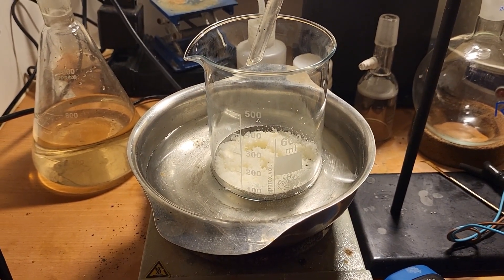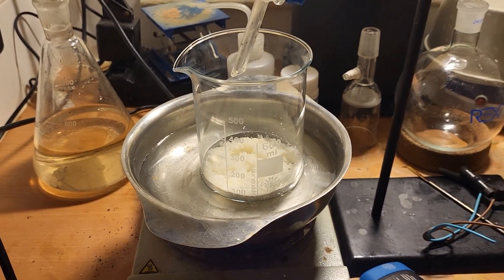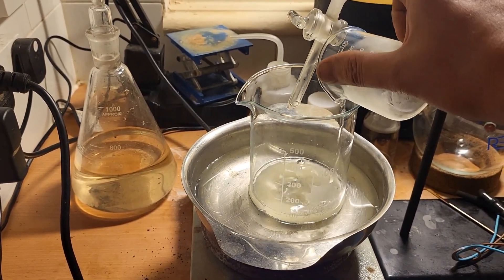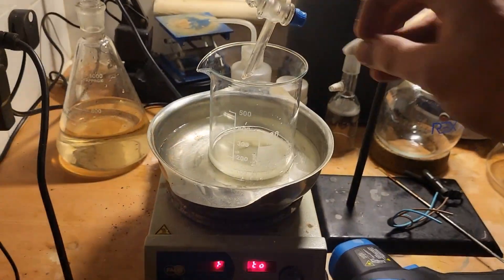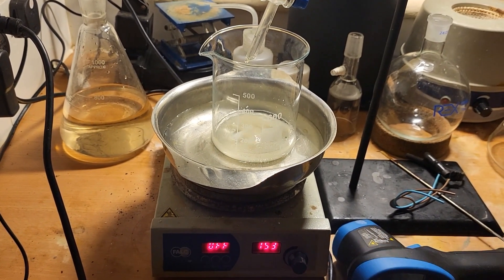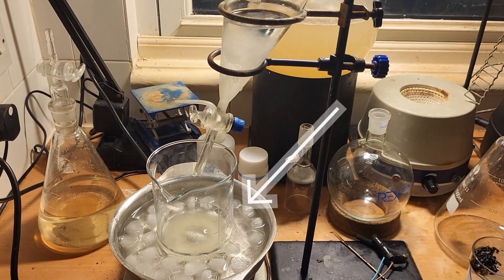In the beaker we have sodium nitrite. I am going to add the alcohol to the nitrite, put a stir bar in there, then switch on the stirring and make a nice bath.